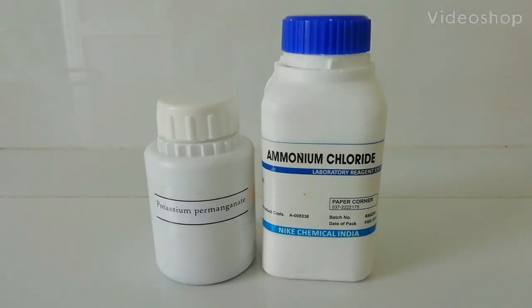Okay, welcome all of you. I saw a video on YouTube about ammonium permanganate, so I decided to make some ammonium permanganate because it's very easy to make.